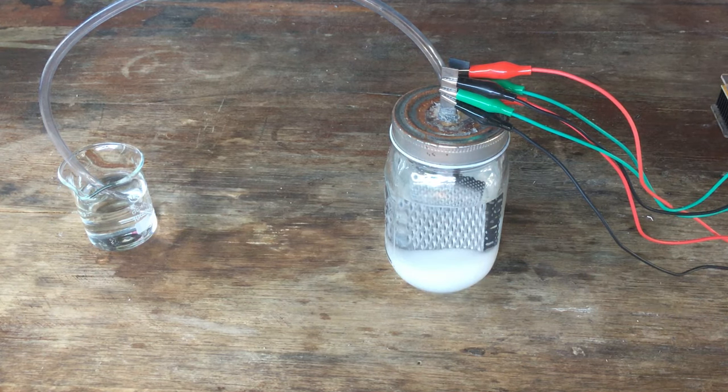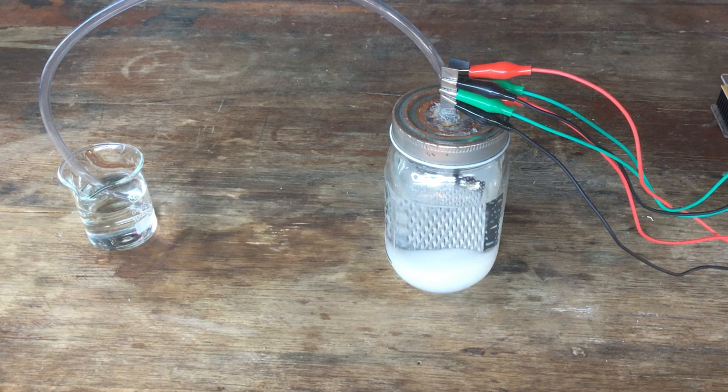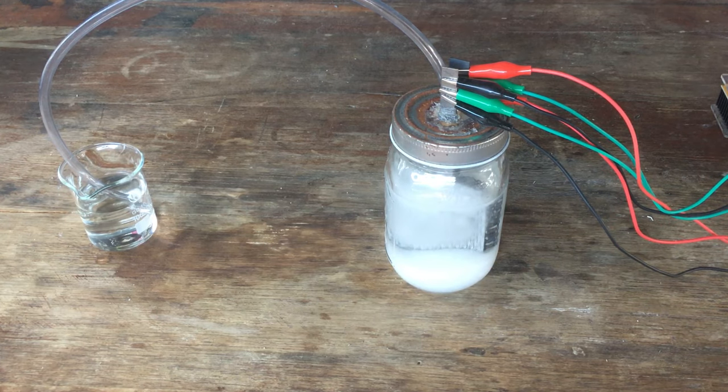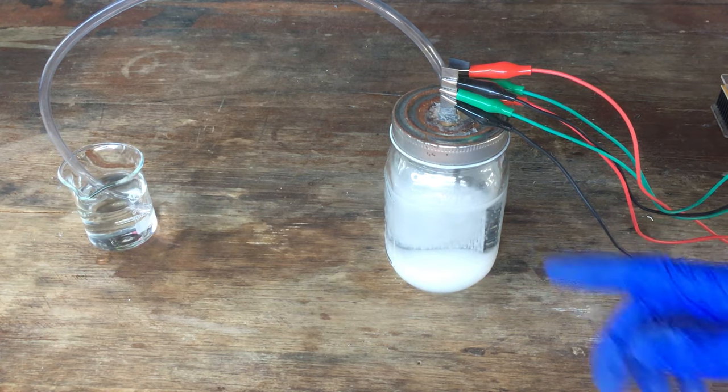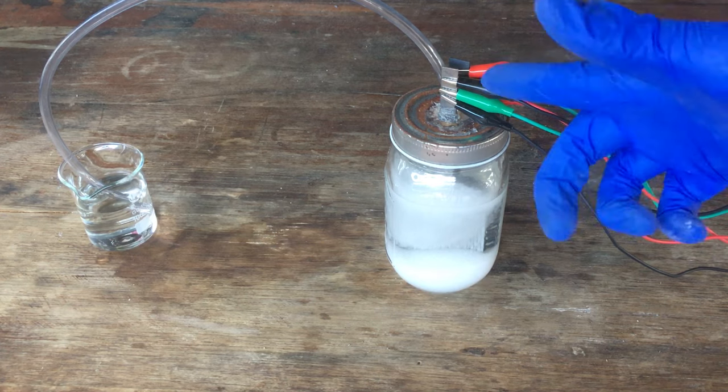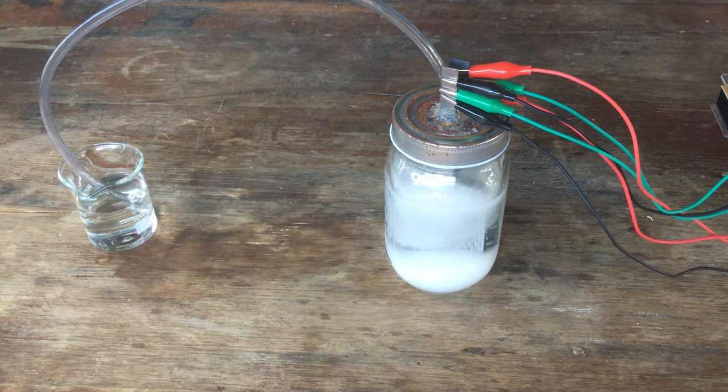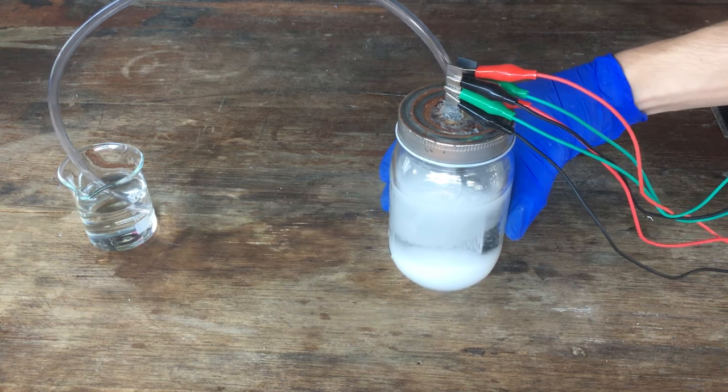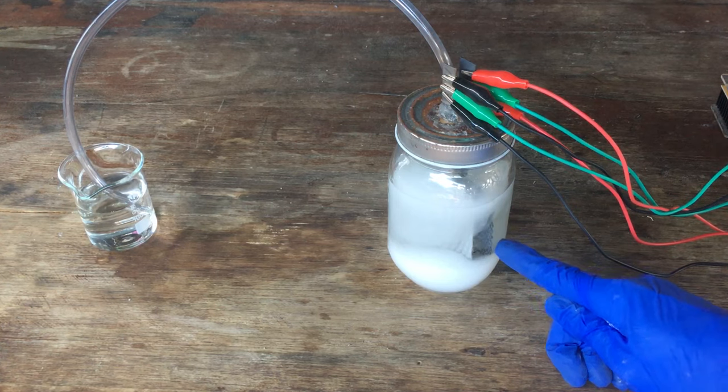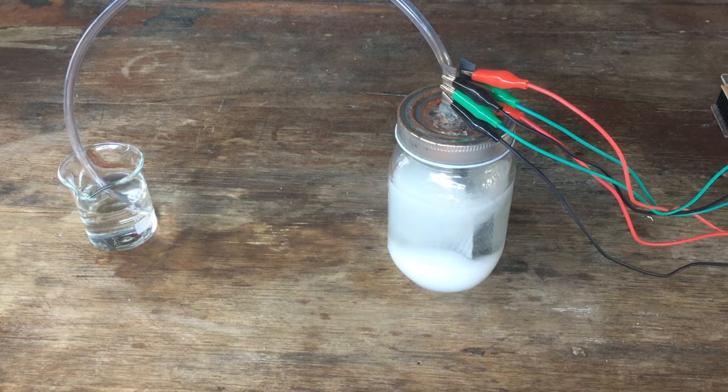It's not showing up very well on camera, but I will turn the current up. There we are, that's approaching 2 amps. You can see a whole bunch of hydrogen being generated on the cathode. That is our negative electrode, the titanium. And maybe if we turn it around a little bit, you can see on the anode over here, there's a little bit of chlorine being generated.